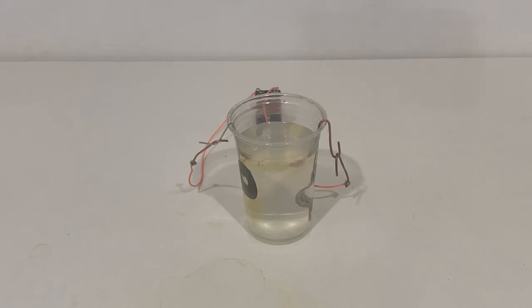I touch the battery and you can see that the solution has taken on a yellowish-greenish color. That would be because the solution has iron-3-hydroxide and iron-2-hydroxide. I would leave this thing on for a few hours — I'll leave it on for the school day — and it's going to have quite a bit of iron hydroxide and iron carbonate and that kind of stuff dissolved inside of it by the end of that.